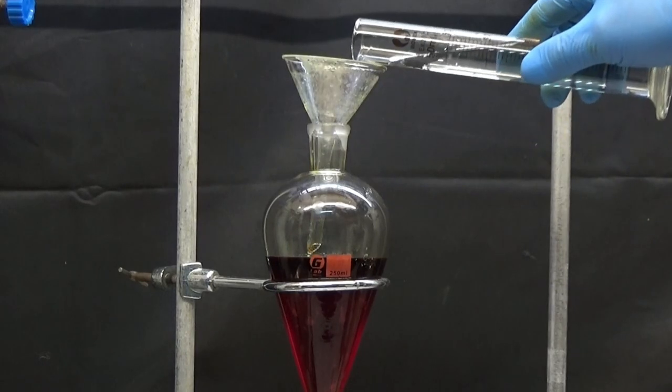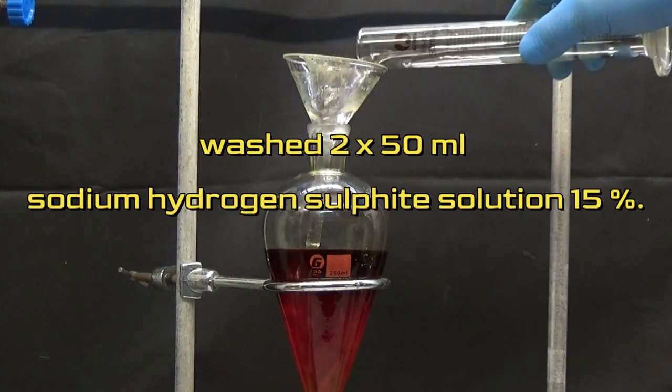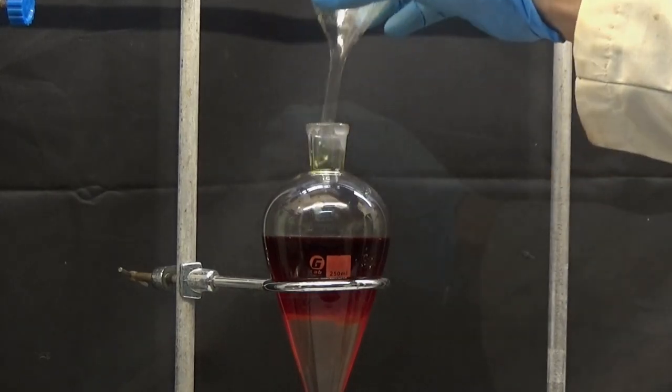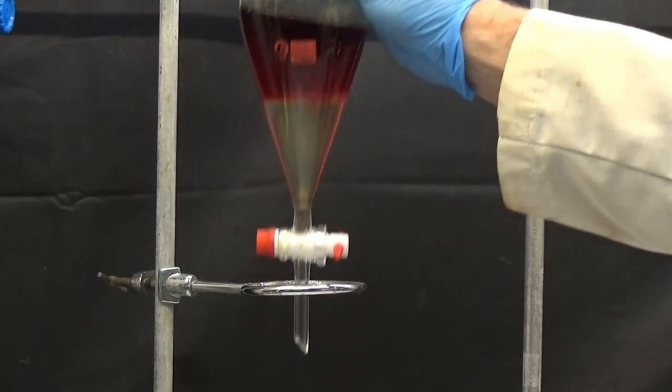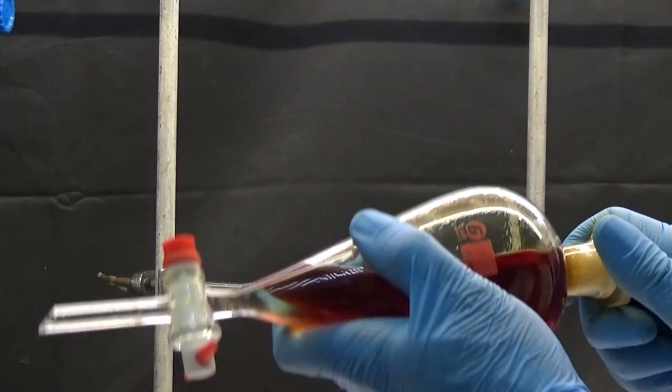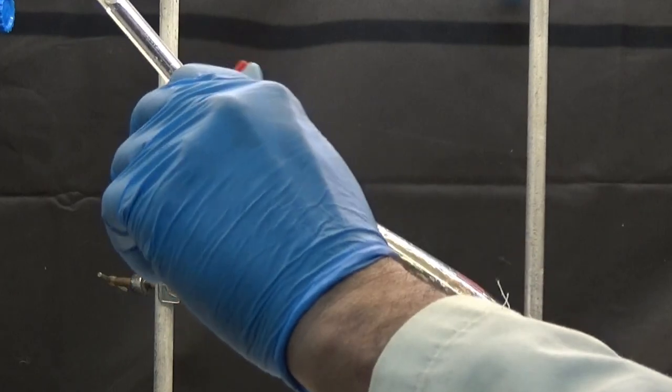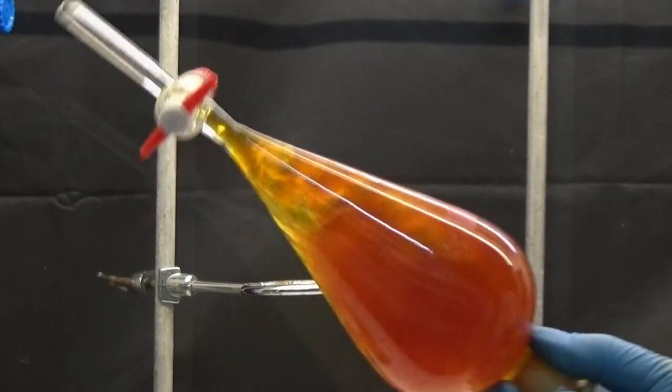The organic phase is washed twice with 50 milliliters sodium hydrogen sulfite solution at 15 percent. In this wash we observe that the red color of the iodine disappears.